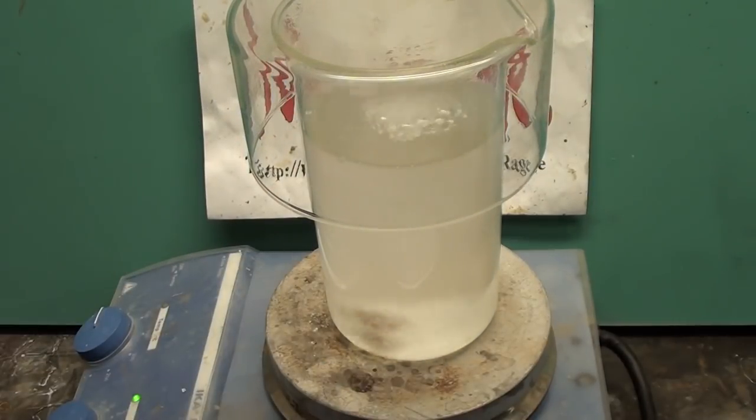Once all of the bleach is added, continue to vigorously stir the mixture until it stops bubbling. This takes about 10 minutes or so.